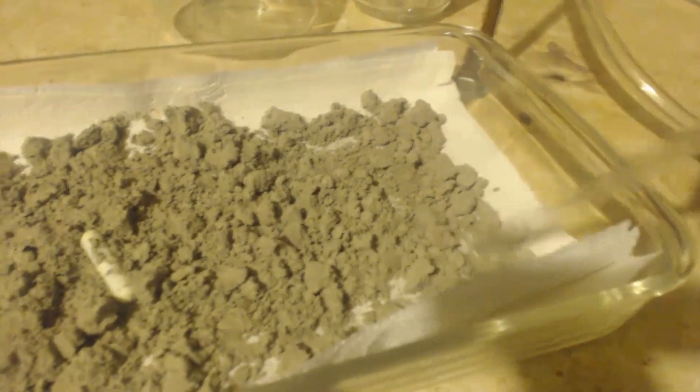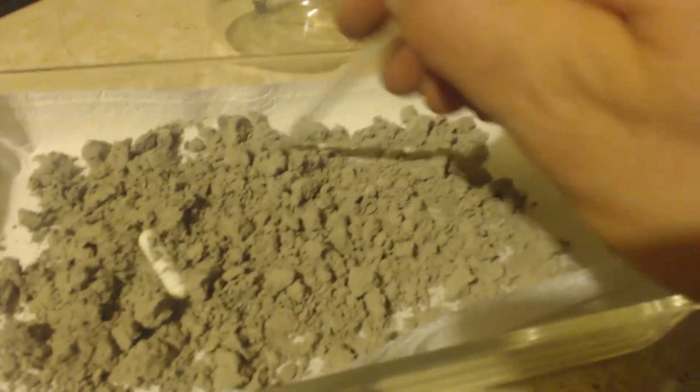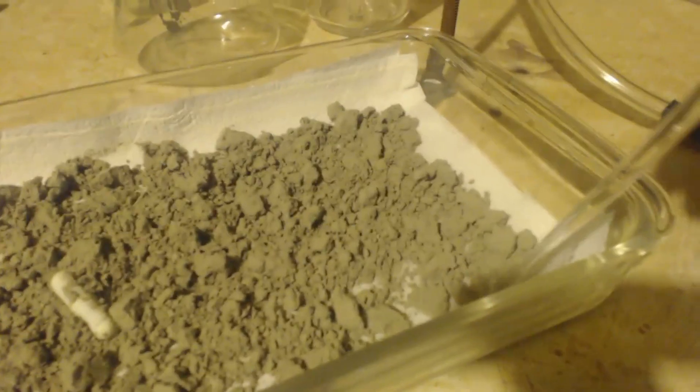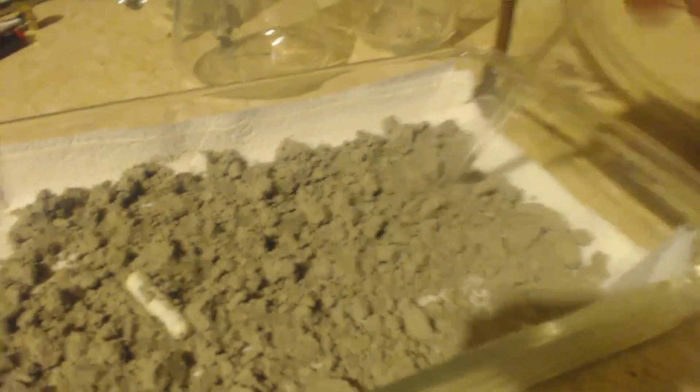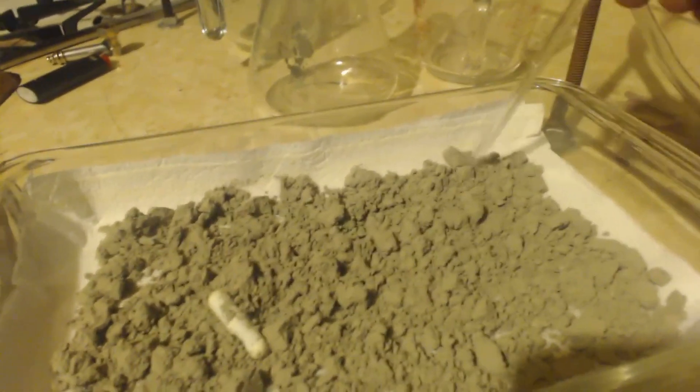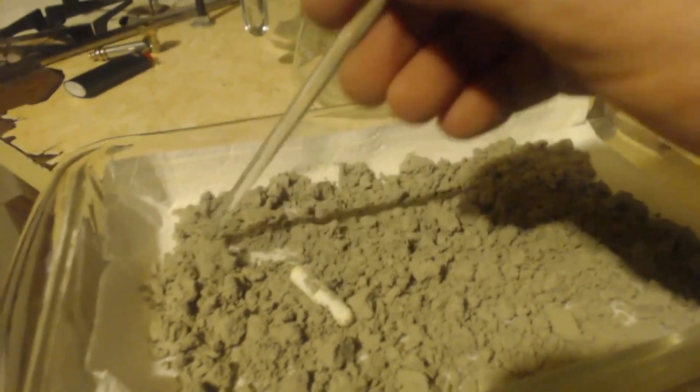At least it's a nice low-boiling thing. It's volatile. It'll evaporate pretty easily, I'm hoping. Remember, don't put this by your stove. You shouldn't really do that. Put it where there's no pilot lights going, no fire, nothing like that.